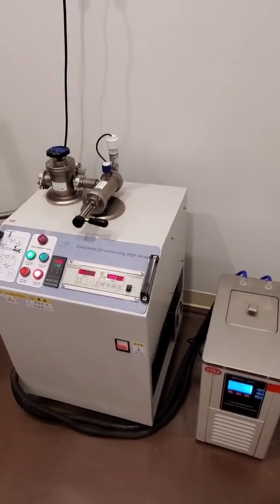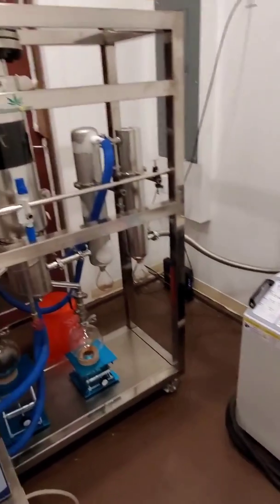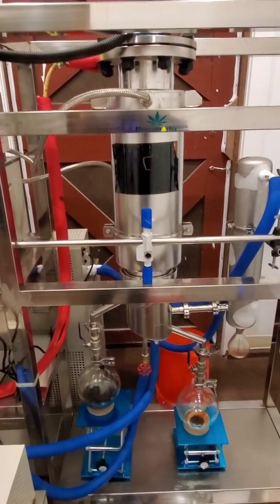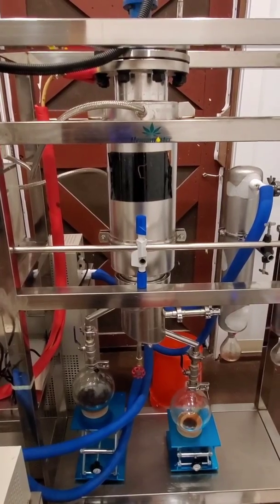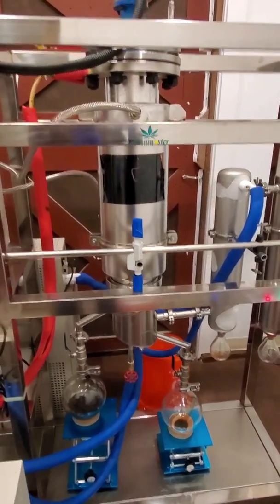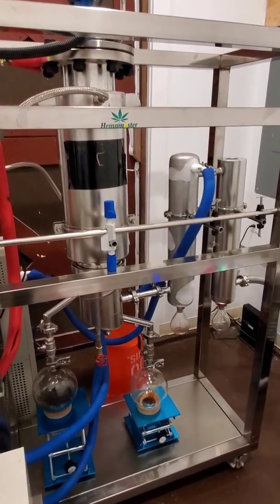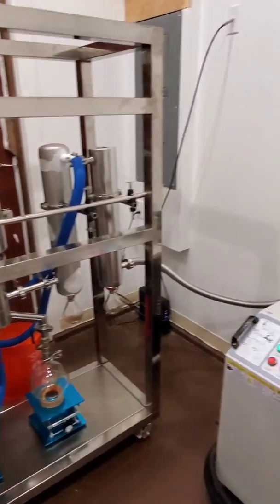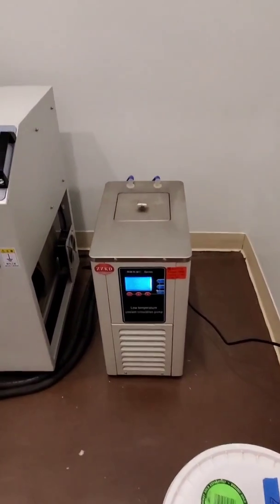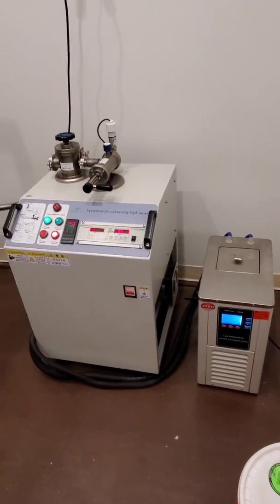So what we have here is a high vacuum pump. This is used to lower the atmospheric pressure of the vessel. The reason why that's important is that as the atmospheric pressure decreases, the vapor point for oil — and actually for all substances — also decreases. That means you need less energy and you have less chance of causing degradation to your cannabinoids when converting crude into distillate, which means you have a higher quality end product. To the right of the high vacuum pump is another chiller, used to keep the high vacuum pump cool.